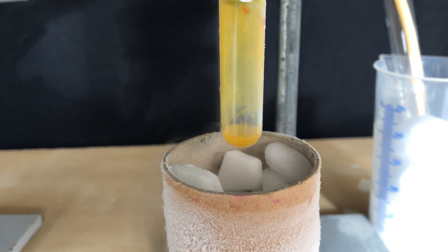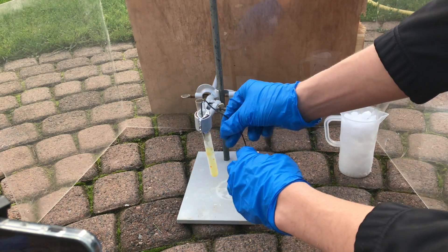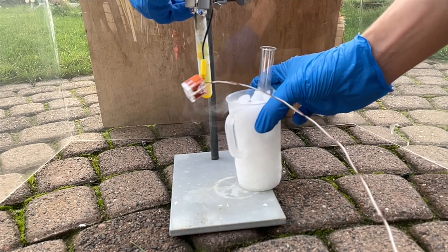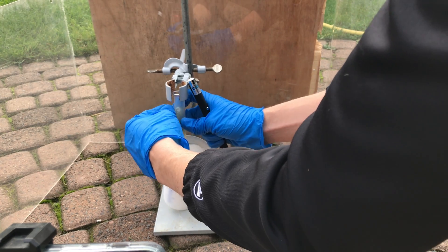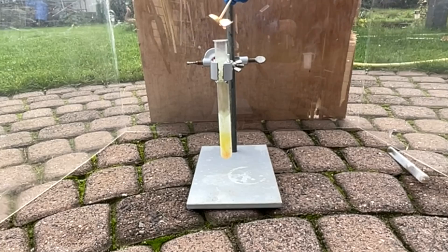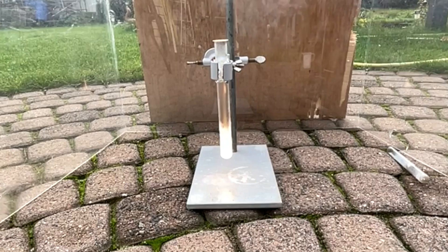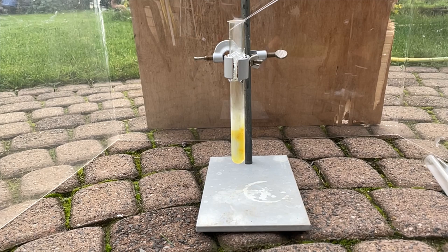If this were elemental chlorine and not chlorine dioxide, it would be a liquid — confirming it is solid ClO2. Having never tried this before, I had no idea how dangerous pure chlorine dioxide actually is, so I set up a remote firing system for the first test. I also tried to ignite the chlorine dioxide using a blue laser, but the laser wasn't strong enough. With a match we ignited it and it looked like a normal reaction between an oxidizer and the match. I then thought to add some MTBE, which would surely ignite upon contact, but unfortunately it just dissolved the chlorine dioxide.